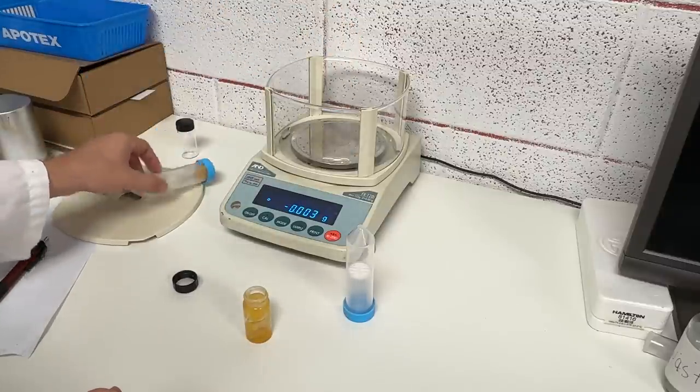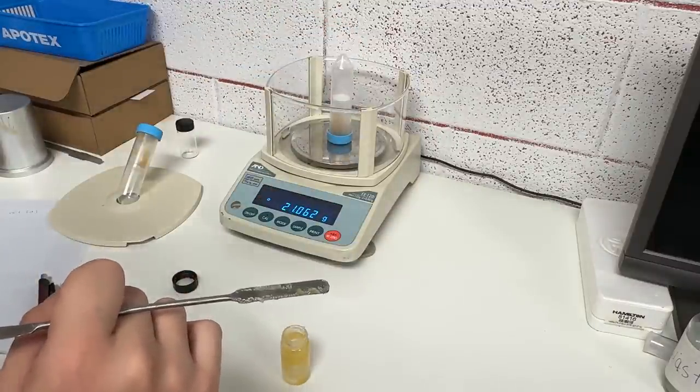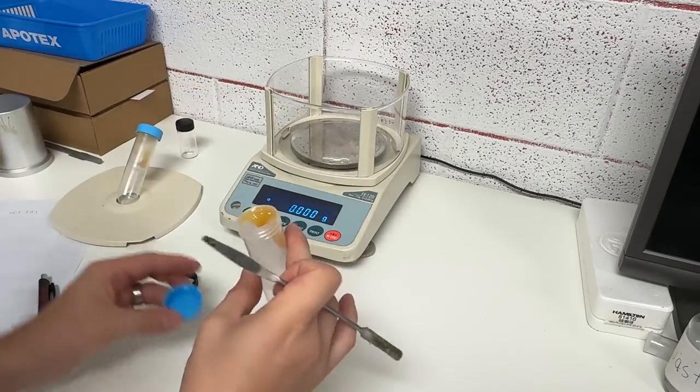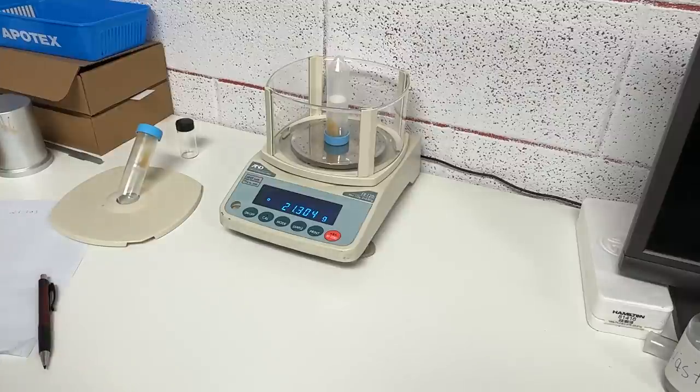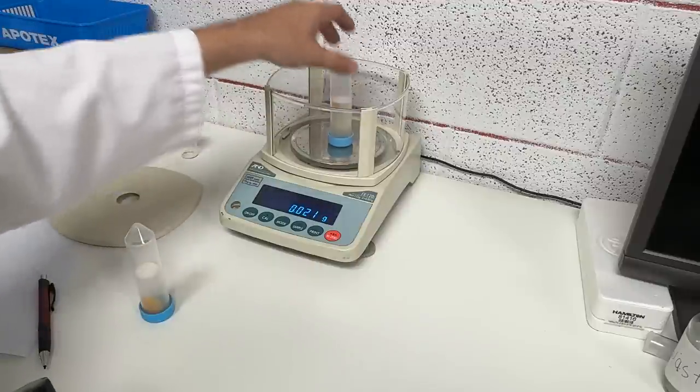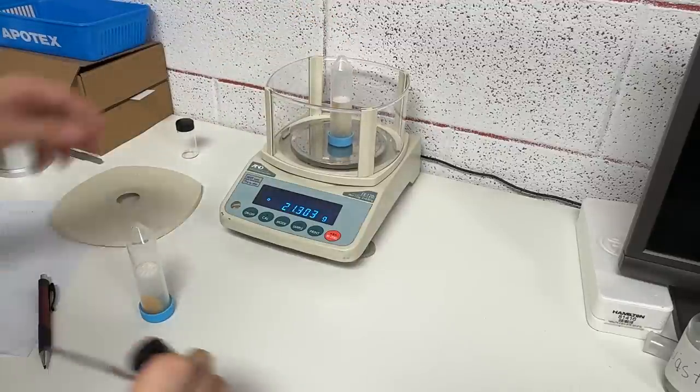20.584 in that one. Three more. 21.303 is the goal. Both within a hundredth of a gram. 21.303. 21.303. Perfect. See that's how you balance them right there.